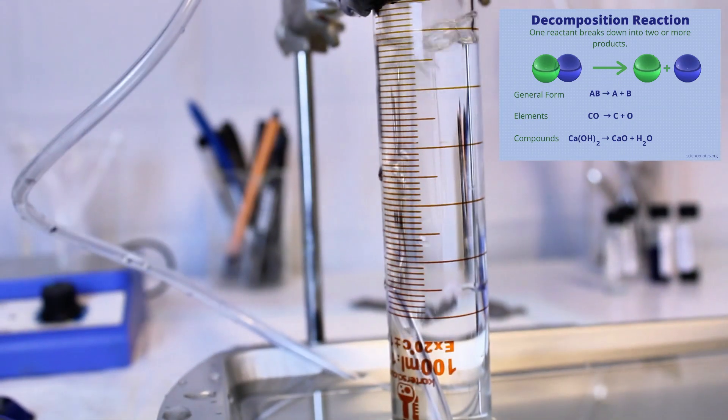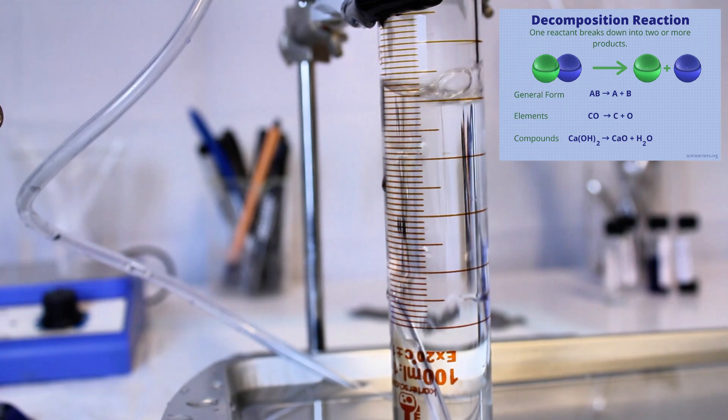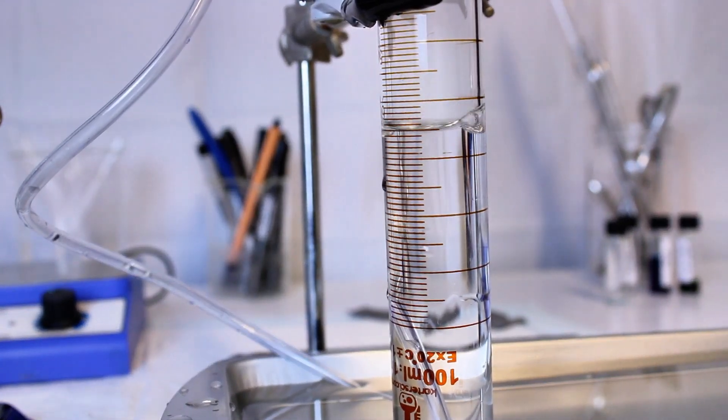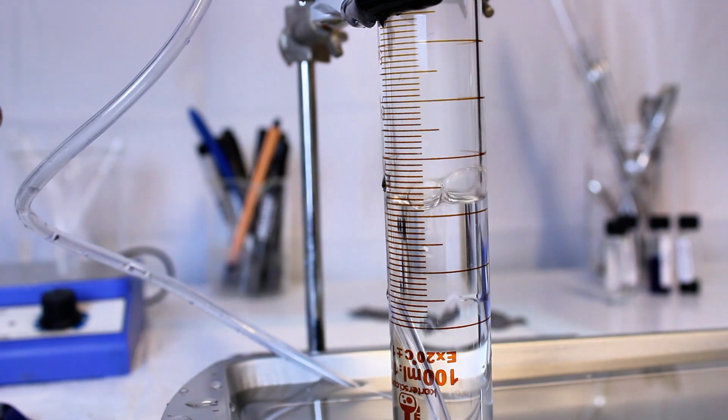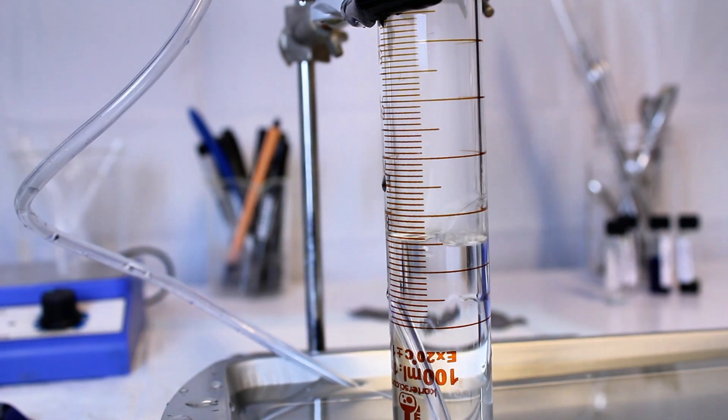Since the target product here, nitrous oxide, is a gas, it's pushed through the tube and displaces water in the graduated cylinder. This technique allows me to easily capture my nitrous oxide gas, and by the end, my graduated cylinder is going to be completely full of it.